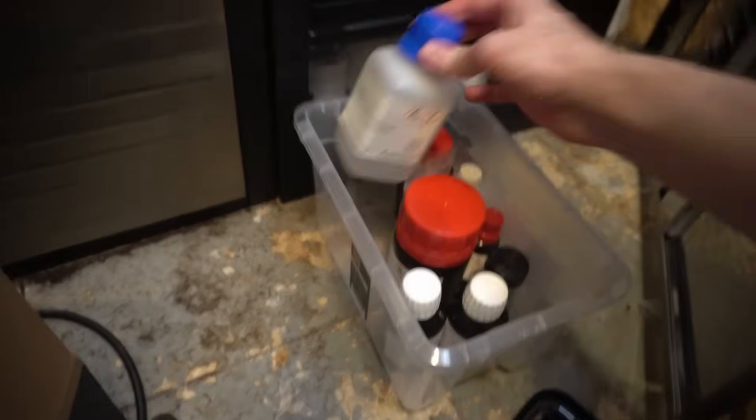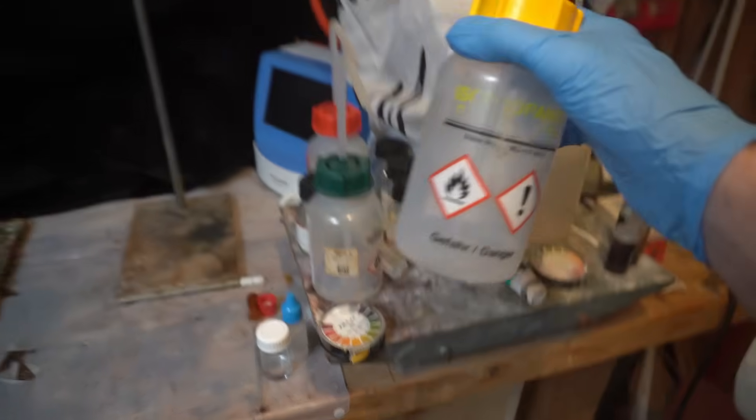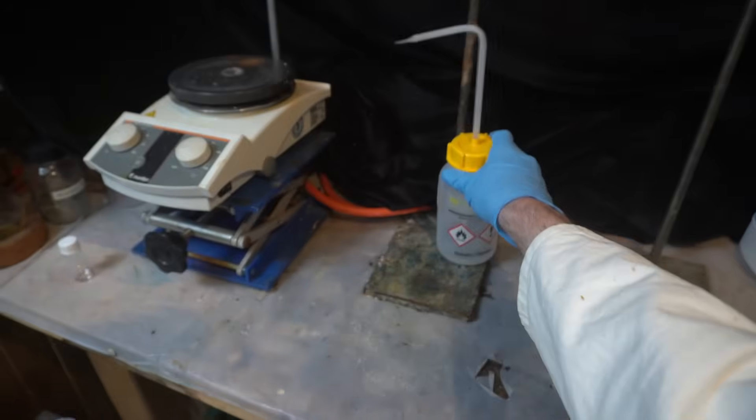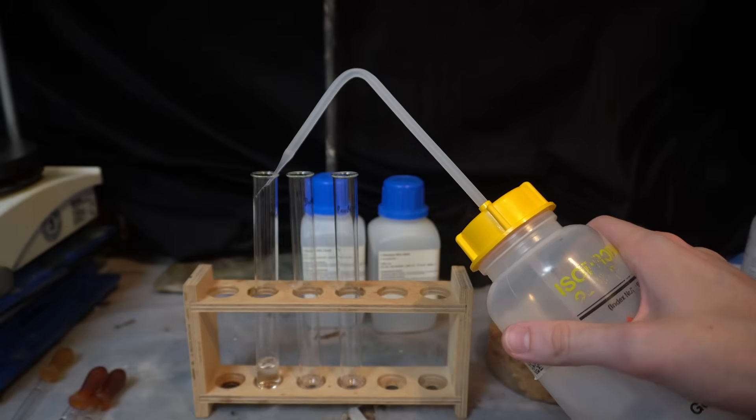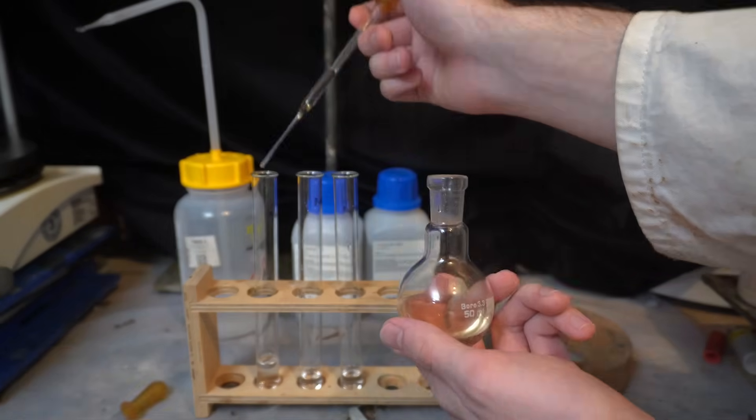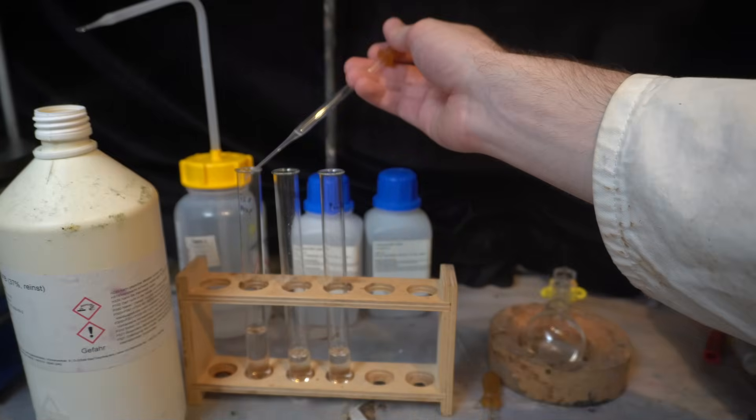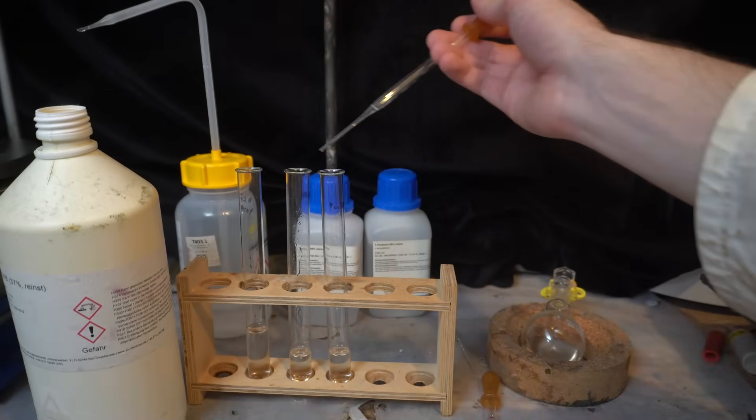So instead, I'm gonna use them to make a few esters with some random alcohols I have in the lab. While searching through my storage cabinets, I found some 1-pentanol and 1-butanol, and on my workbench is a squirt bottle with isopropanol. For this demonstration, I don't really care about stoichiometry, so I'm gonna add roughly equal parts of anhydride and alcohol to each test tube, and then a small drop of hydrochloric acid as a catalyst.